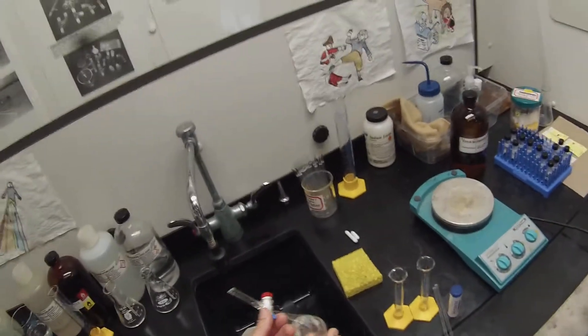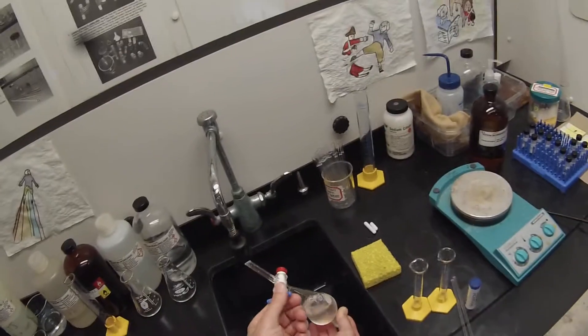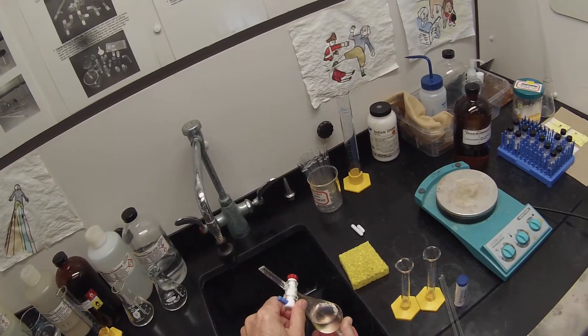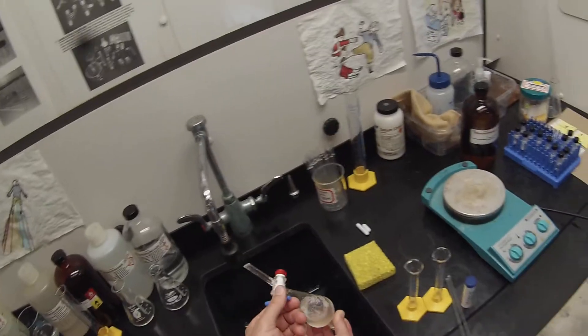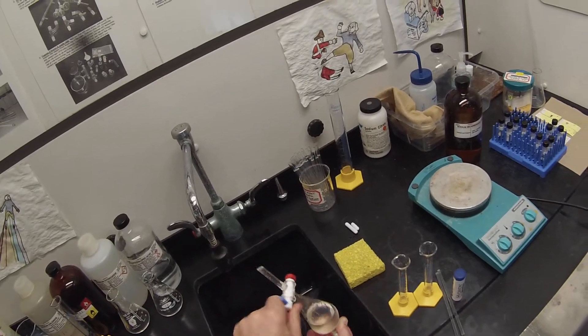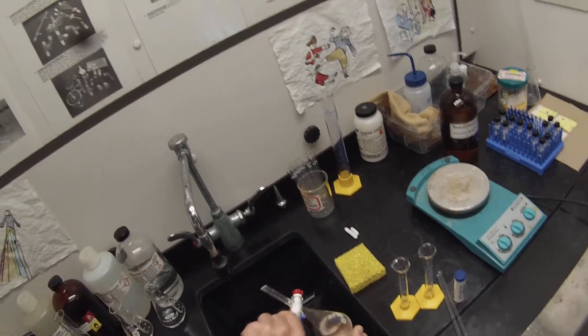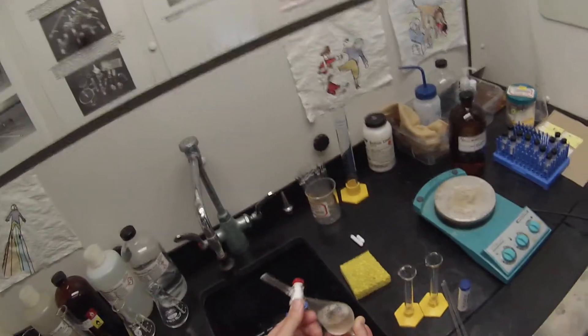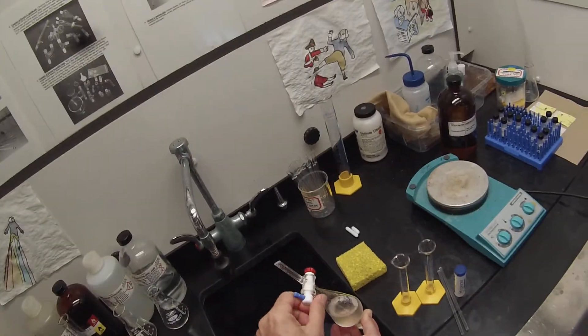We're going to add the second portion of the hydrochloric acid and shake that around a little.